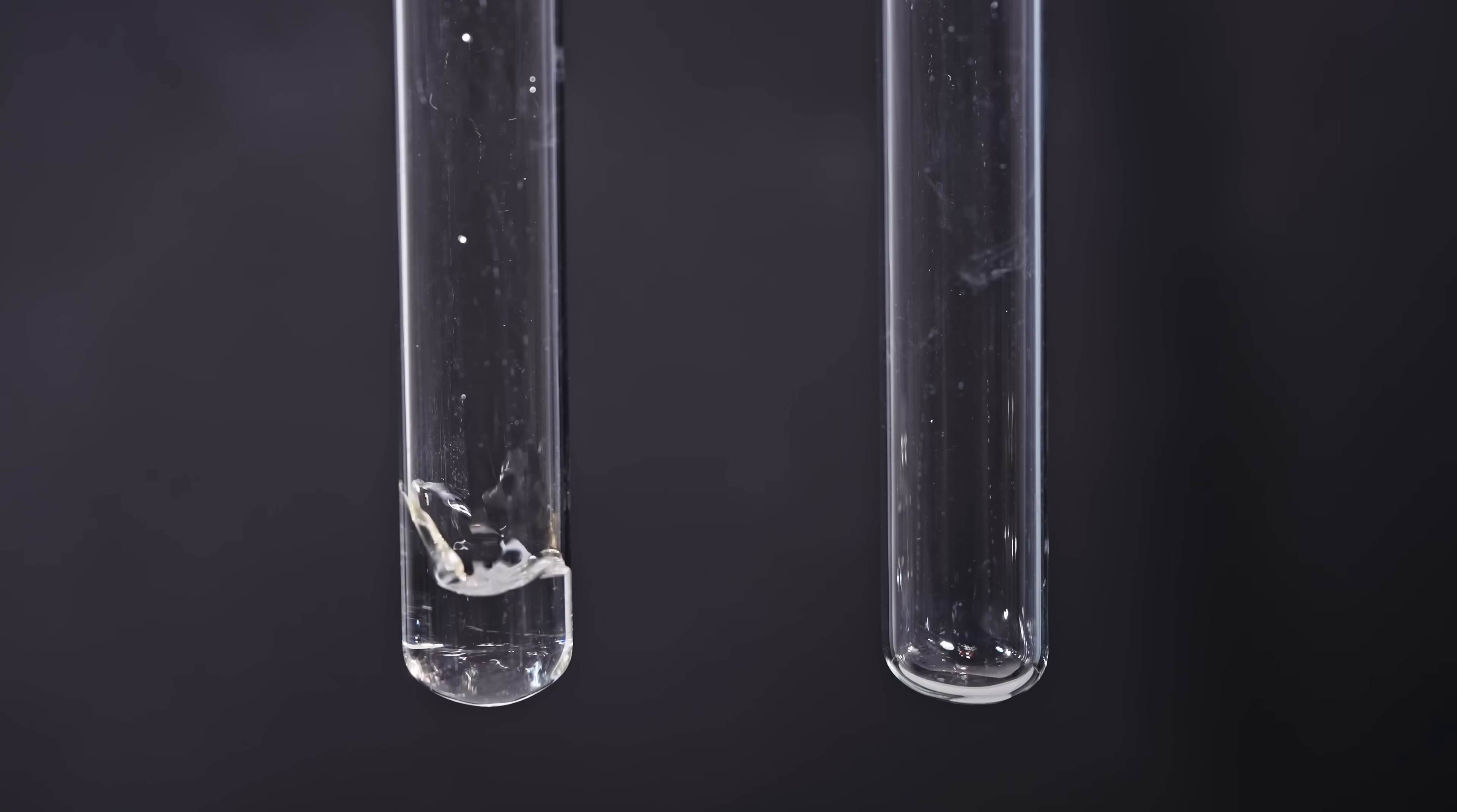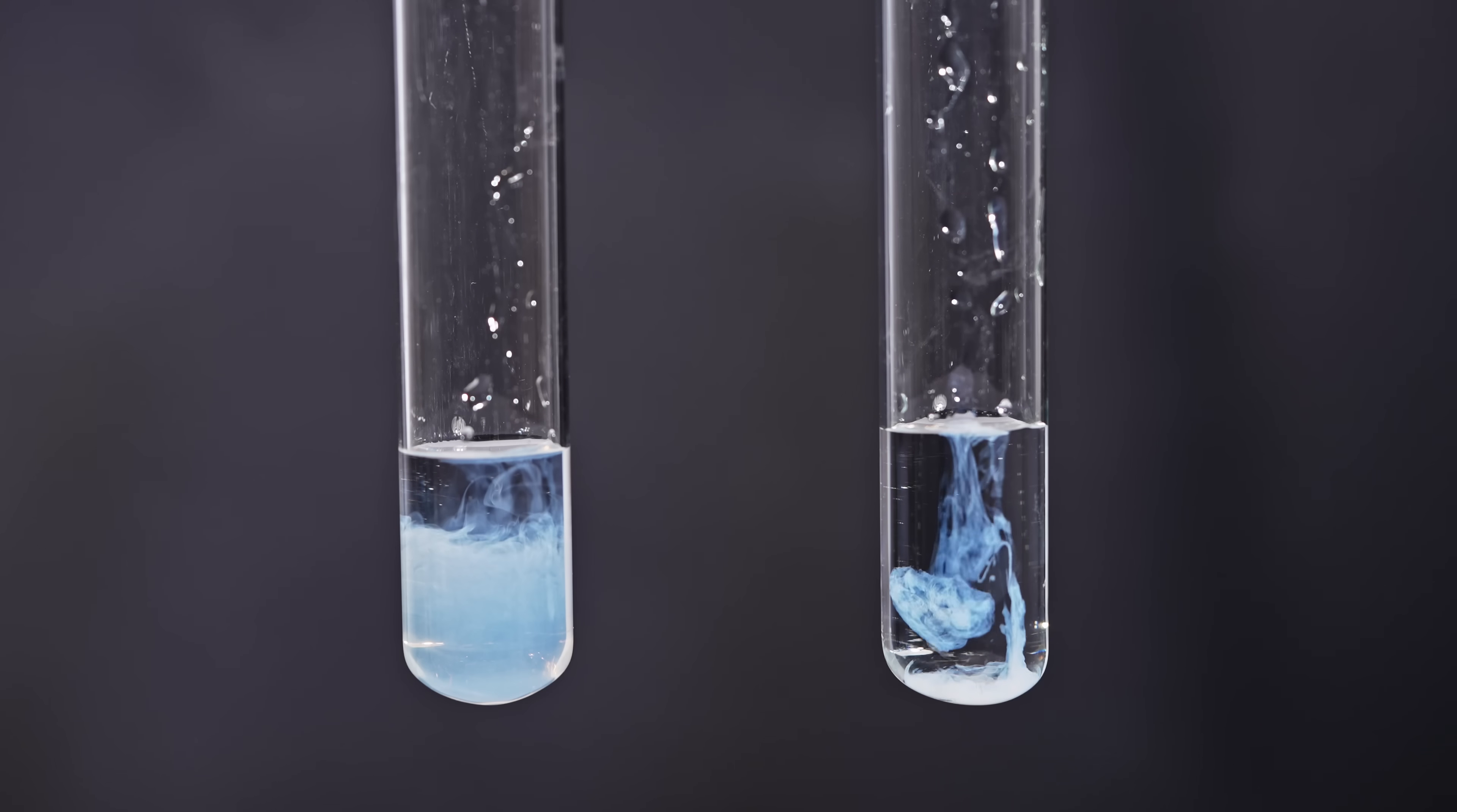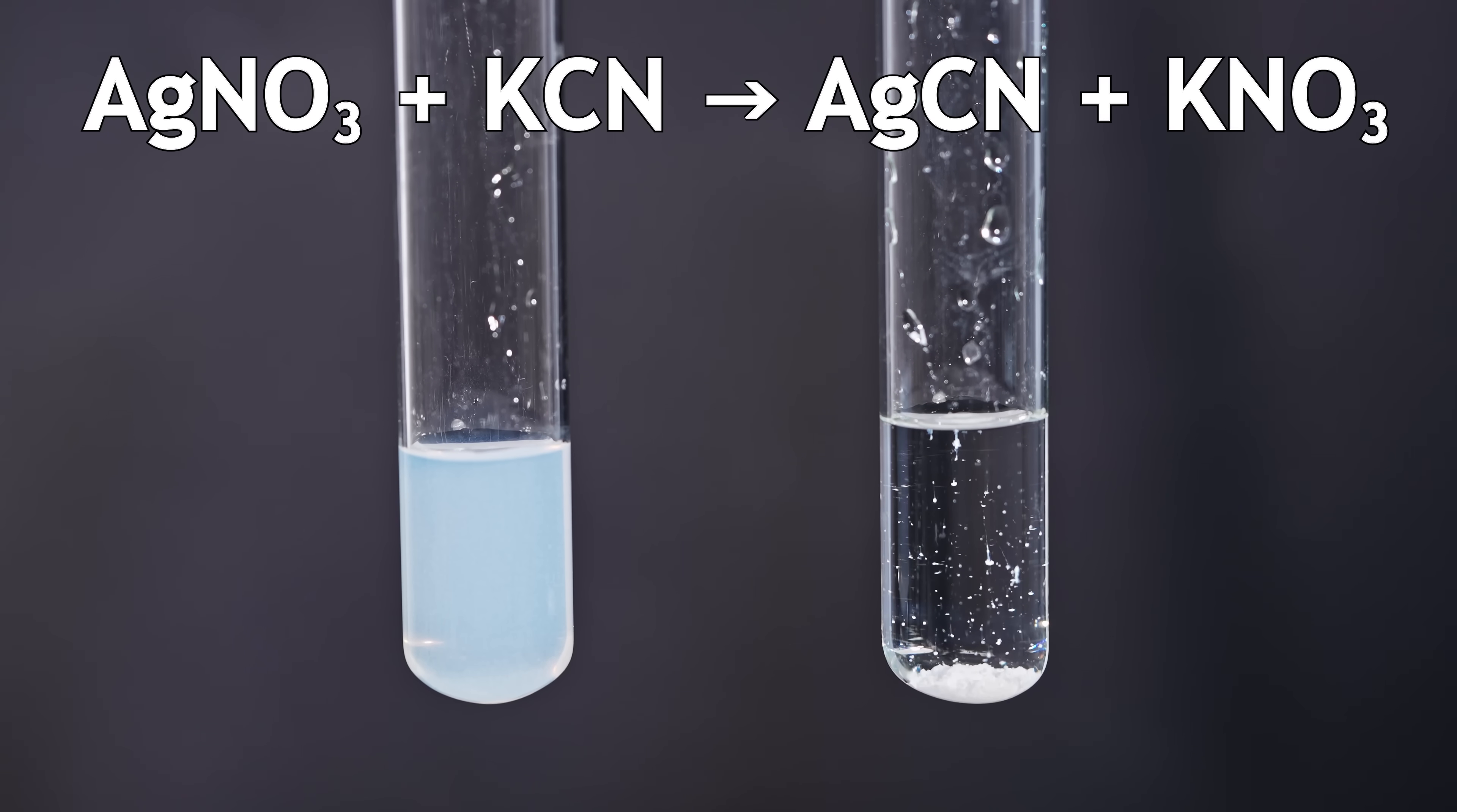Well, now let's move on to the synthesis of cyanogen. Here, I add a concentrated solution of potassium cyanide to silver nitrate. In the right test tube, the concentration of silver nitrate is 10 times higher than in the left one. This reaction produces a very interesting silver salt, silver cyanide.